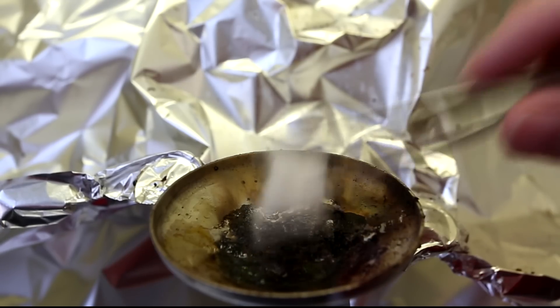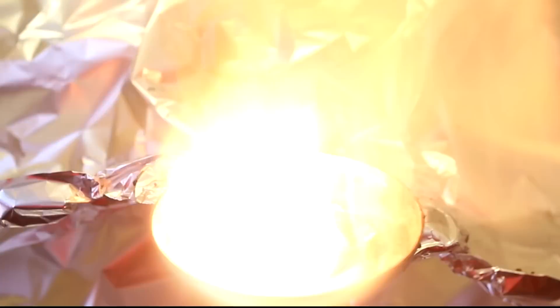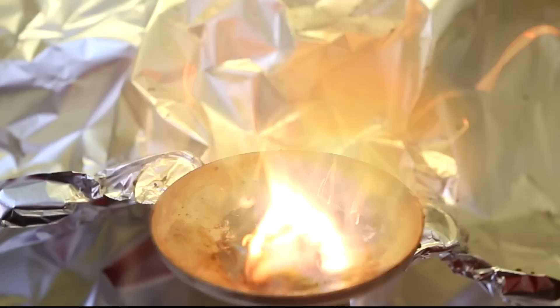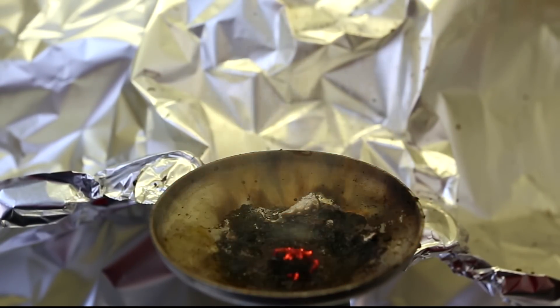Next, I tried cotton, which seemed to react much more violently than the paper. I attribute this to the fact that the surface area of the cotton is going to be much greater than that of the paper.